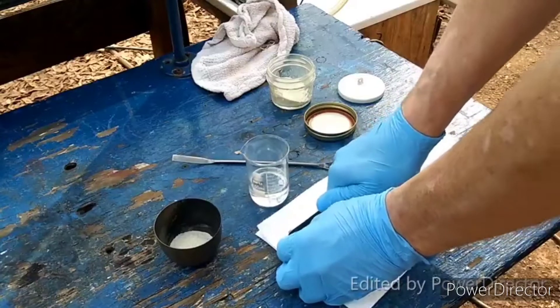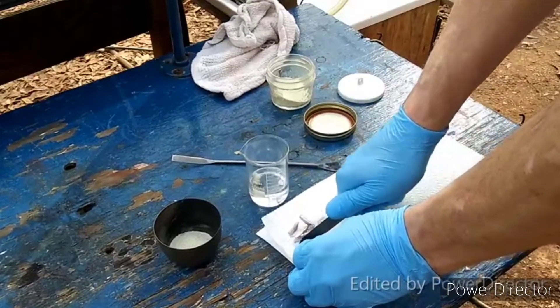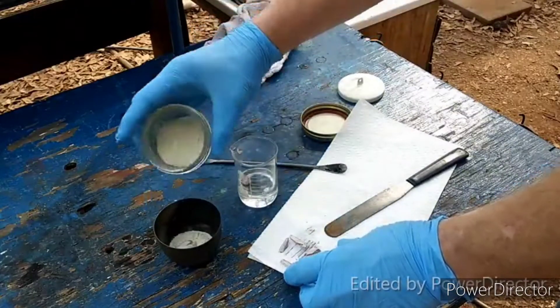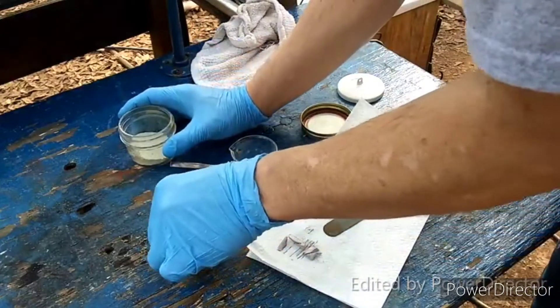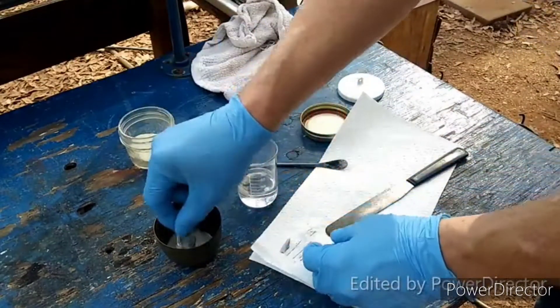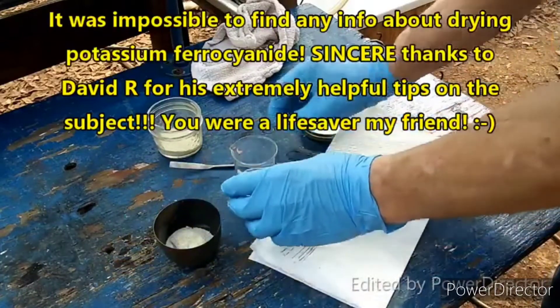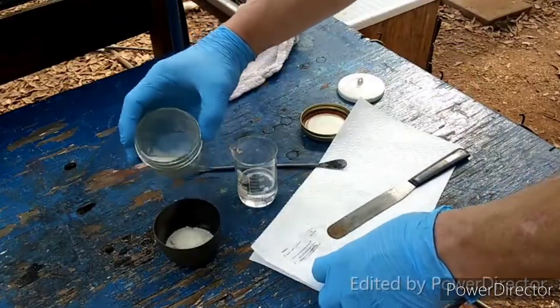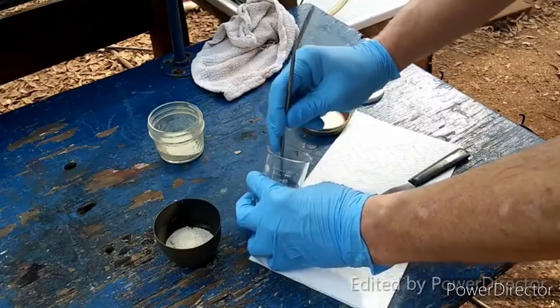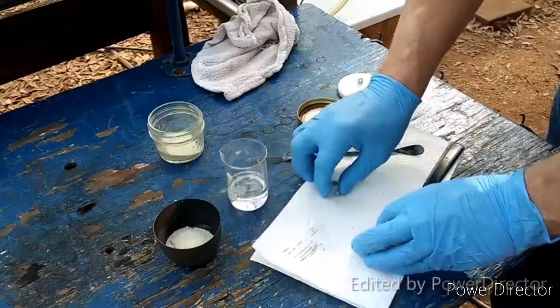Did I wipe the xylene off those other slivers earlier? I hope so. My biggest fear with this thing yesterday was that there was going to be residual water in it and the sodium was going to react angrily with that water. But that never seemed to materialize, which was good because I was very, very nervous about doing this. Yesterday I had a few little extra pieces of sodium metal, which was interesting when I went to go dissolve this in water — just FYI, watch out for that.